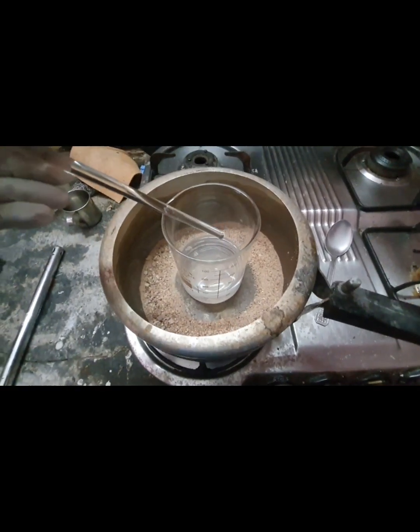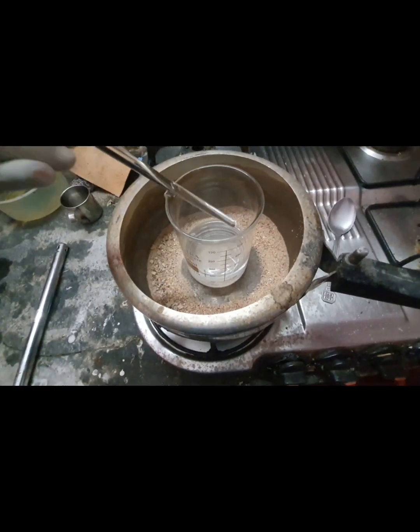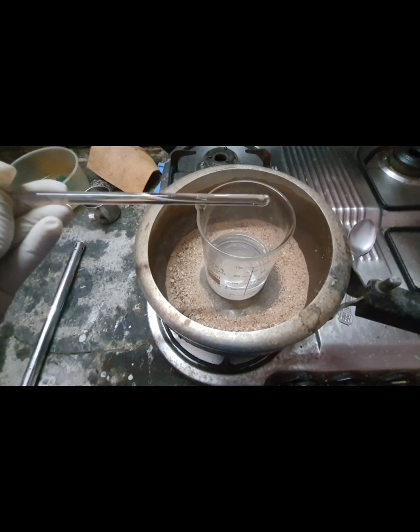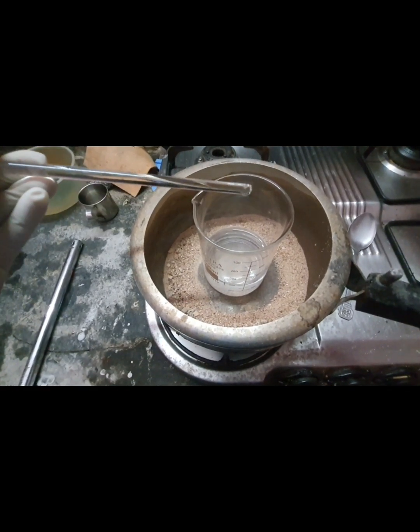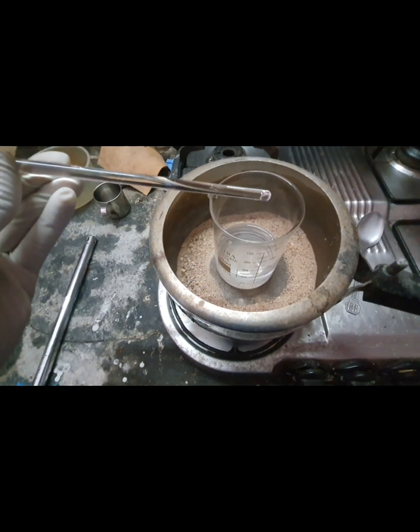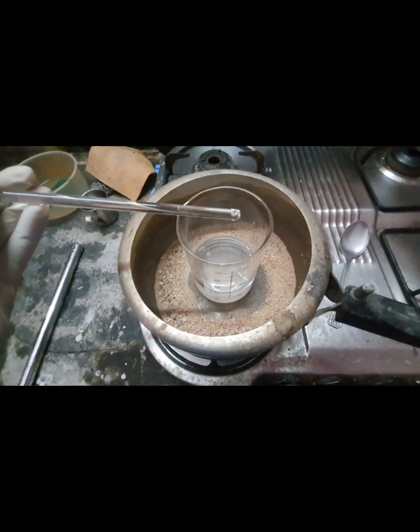One thing to notice is that when you see the water boiling out and the concentration is reduced, the hexamine will be coated. When you dip your glass rod into this mixture and have a look at it, you can see that the hexamine has been precipitated on the surface of the glass rod. It means that most of the water which was produced as a byproduct in this reaction has vaporized, and it's time to switch off the heating and place it at room temperature.